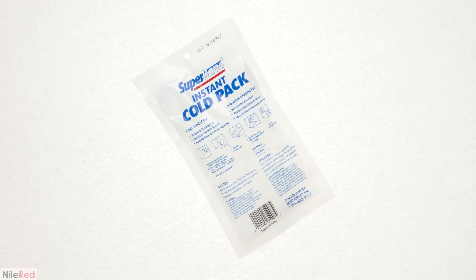It's way easier and cheaper to just buy it or to get it from some instant cold packs. I'm just doing it to explore the science, and despite it being honestly pretty gross, I think it might be fun.